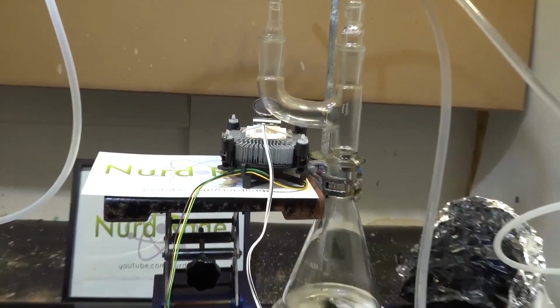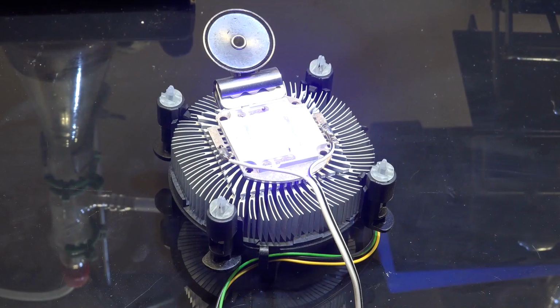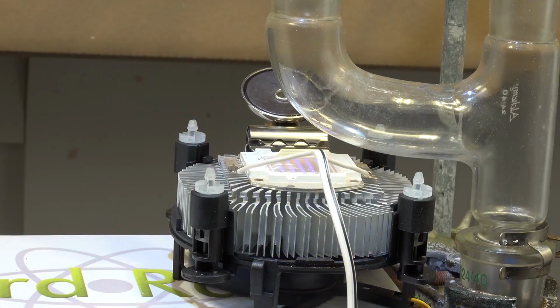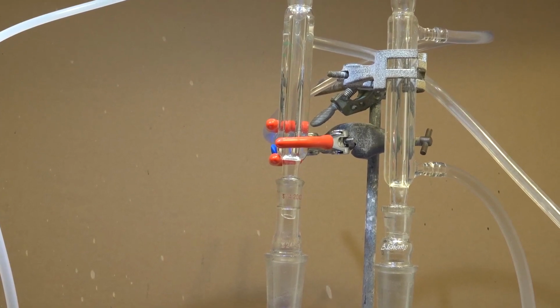Once the two gases are mixed, the fun part happens over here when it passes over the ultraviolet light emitting diode chip, or UV LED chip. The wavelength is about 400 nanometers. Now the UV light initiates the reaction between the gases, and the heavier products will condense in this exit column and drip back down into the boiling flask. The lighter byproducts will not condense and exit out the top.